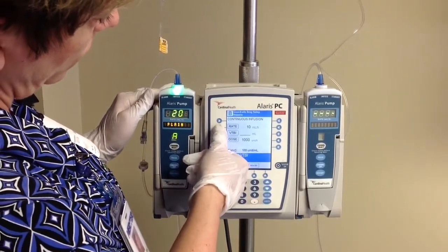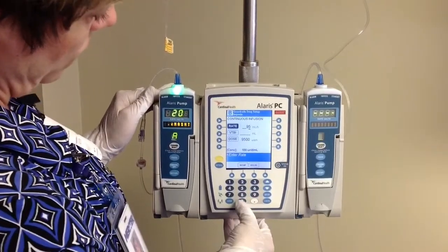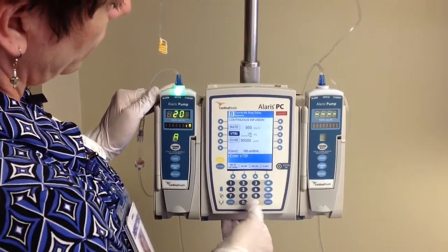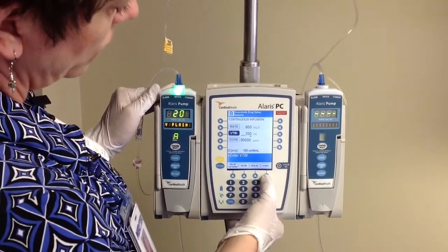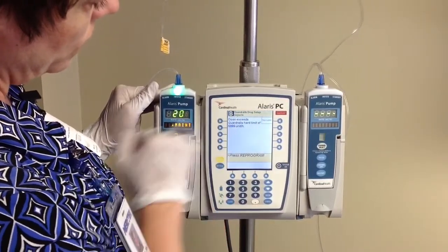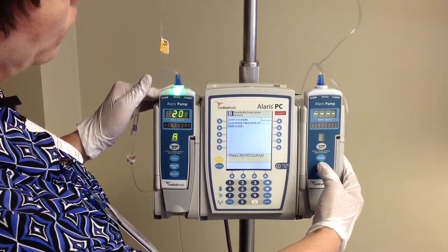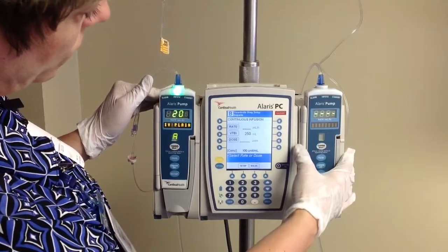So we're going to first dial in our rate. Per our order, the initial rate is 9.5, or 950 units, and our volume to be infused is 250 mLs. We're going to hit start there, and note that we immediately get a warning because we've exceeded our hard limit of 5,999 units per hour.